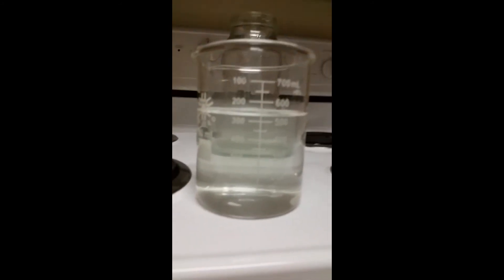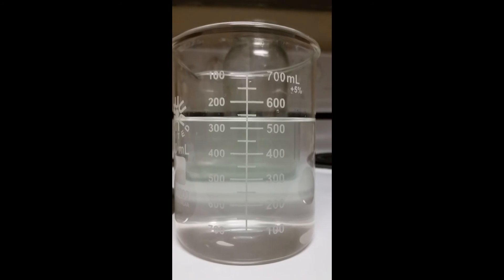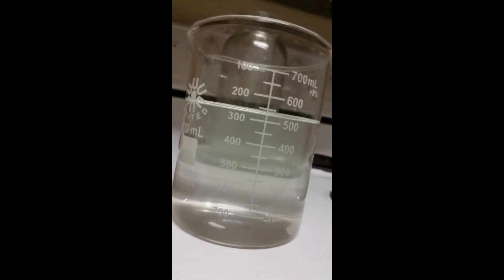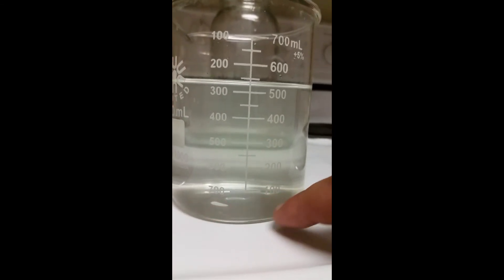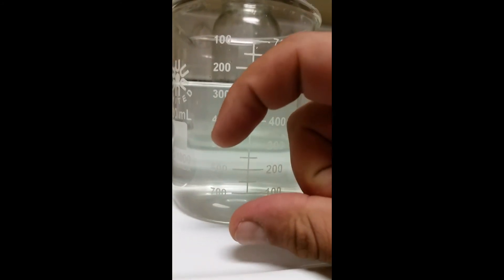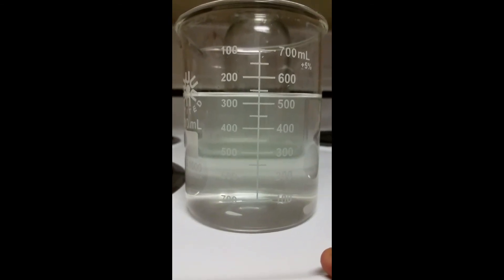I started out with 500 milliliters of water. As you can see, I have about 550 milliliters — I'm a little shy. So you definitely know something is dissolved in the solution itself. Once I throw it in the freezer, you're going to see the crystallization happening at the bottom and slowly going up. You're going to look for these long crystals — that's how you know it's potassium nitrate. So let me throw it in the freezer and we'll be back.